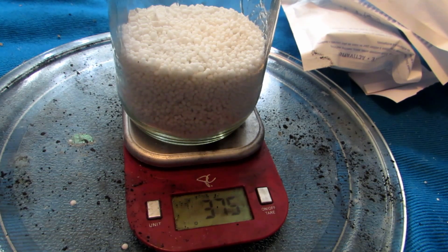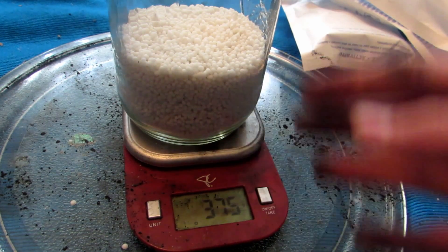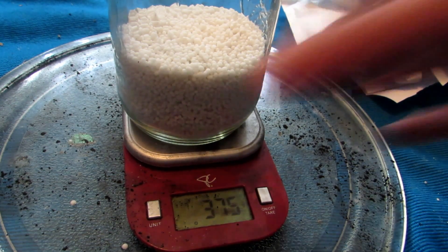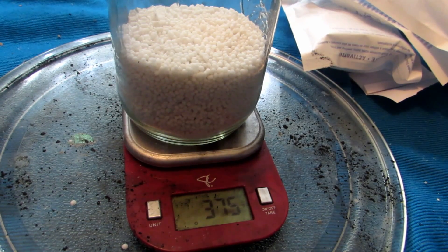We must take a fair amount of water to dissolve everything, because we're going to filter the solution to get rid of all the anti-caking agent, which stops it from clumping together. We'll add the minimum amount of water to make everything dissolve. There will be floating impurities from the anti-caking agent. Because this is calcium ammonium nitrate used in cold packs, upon adding water it's going to get very cold, so use fair stirring to make sure everything dissolves.